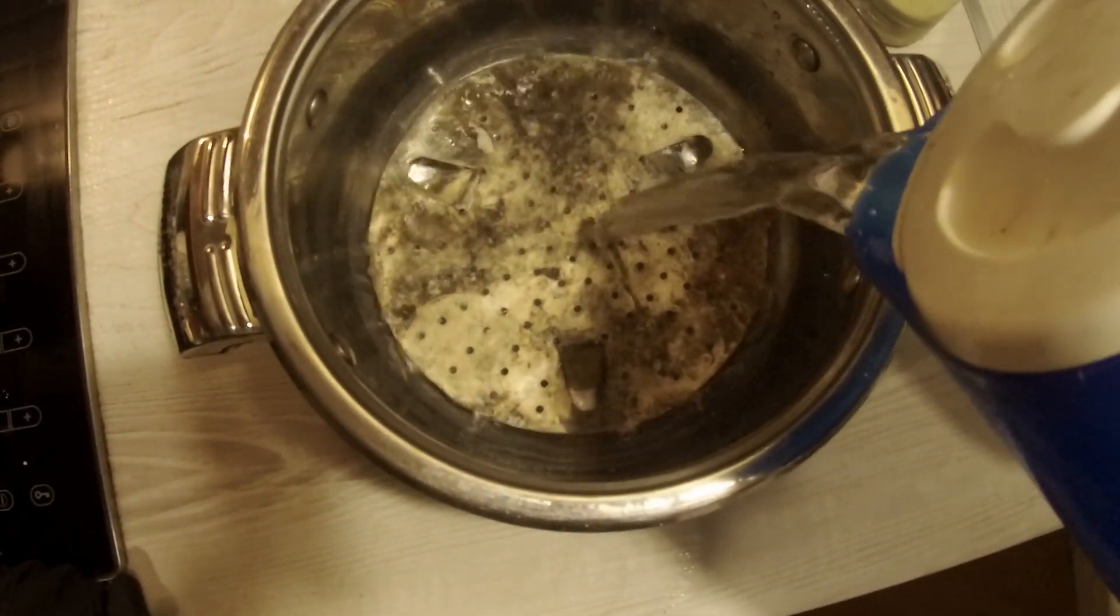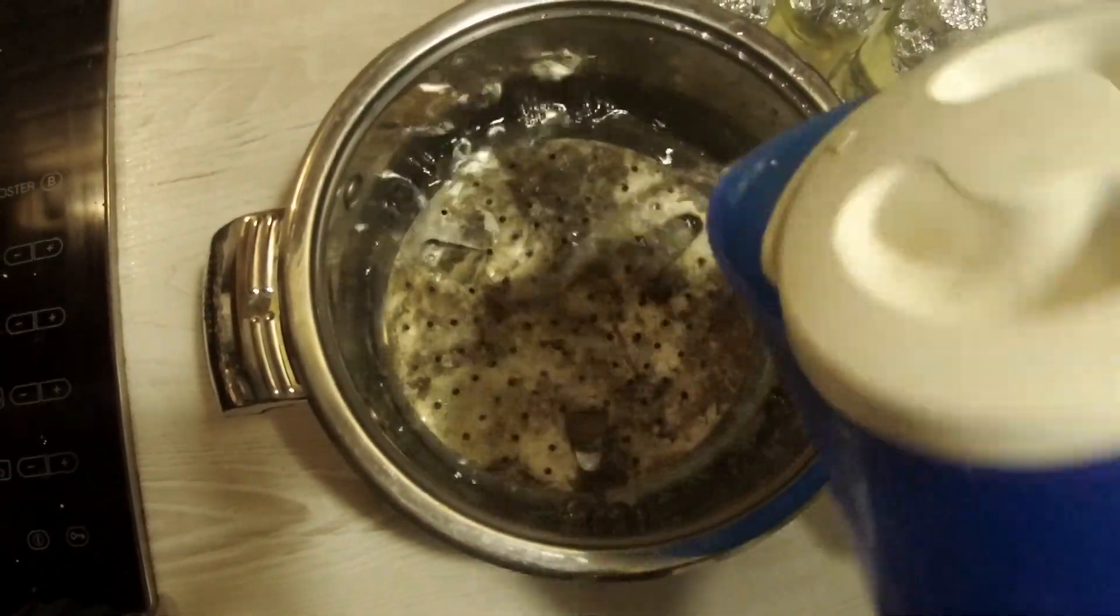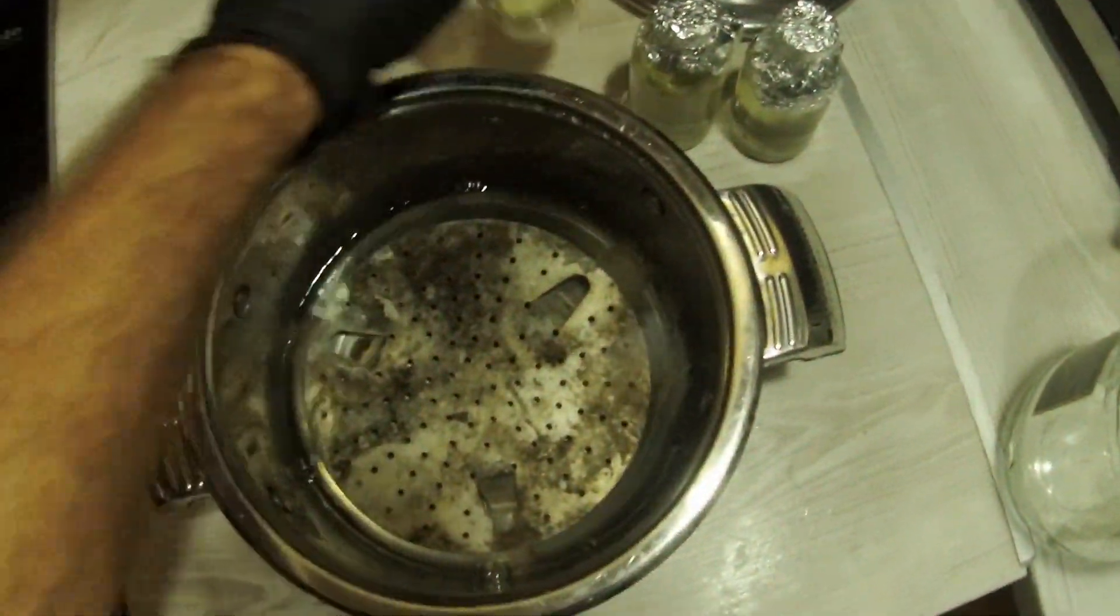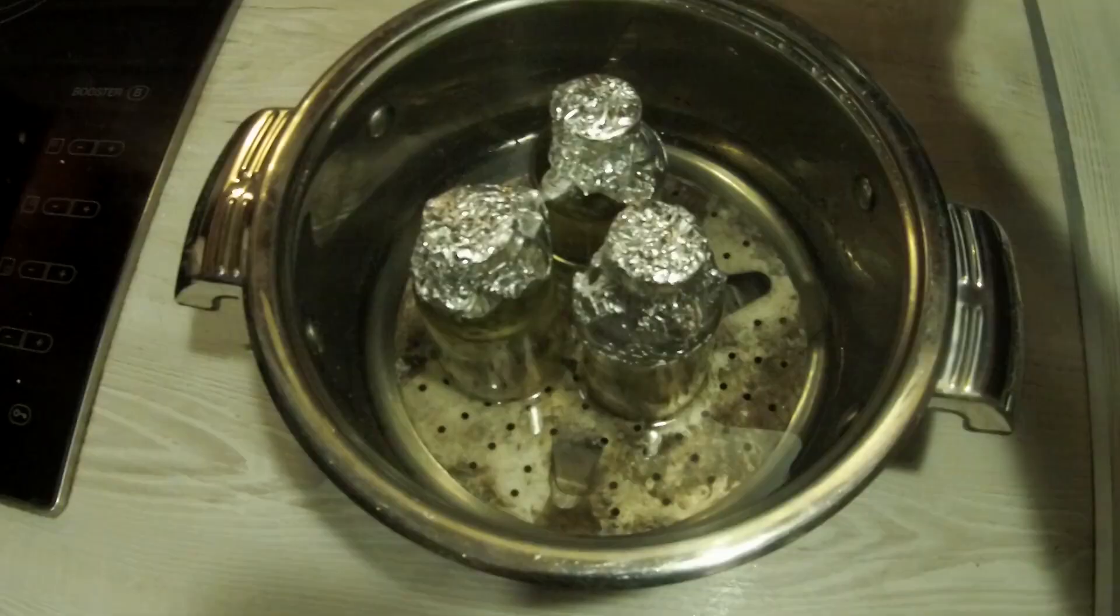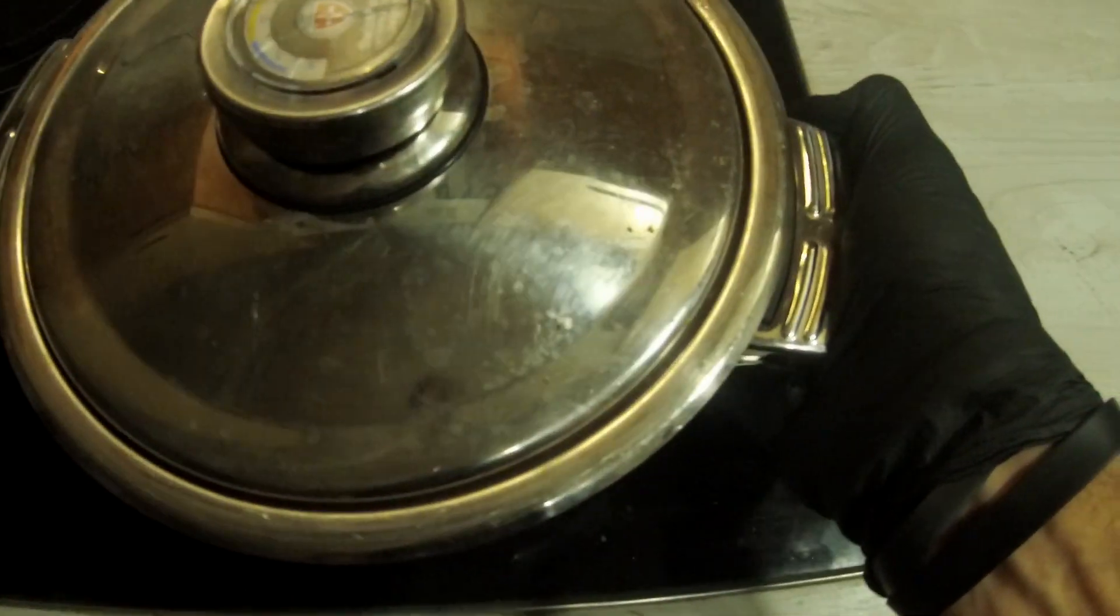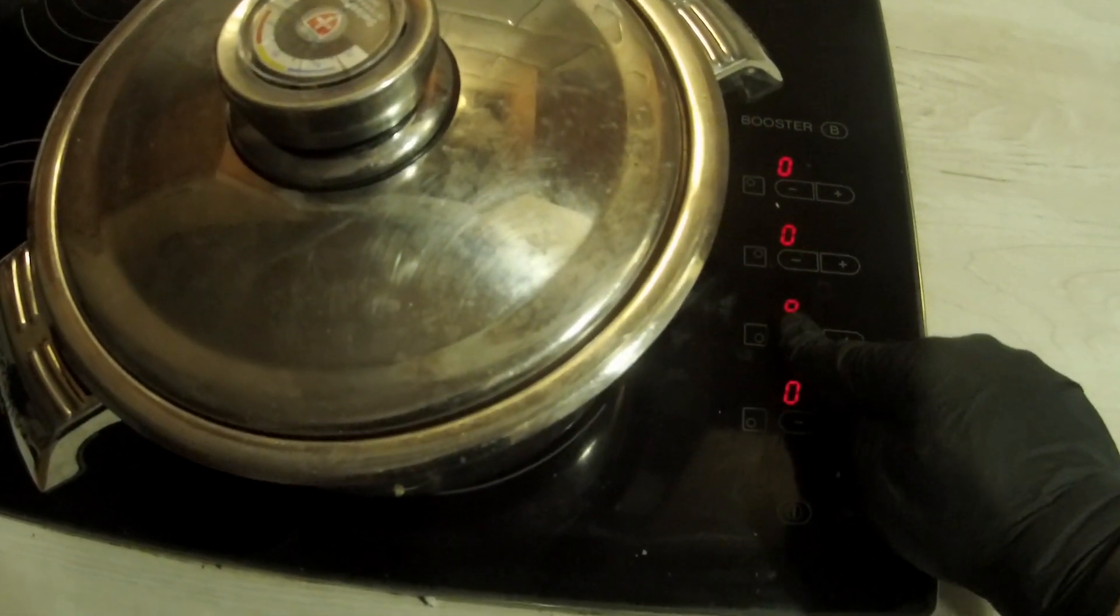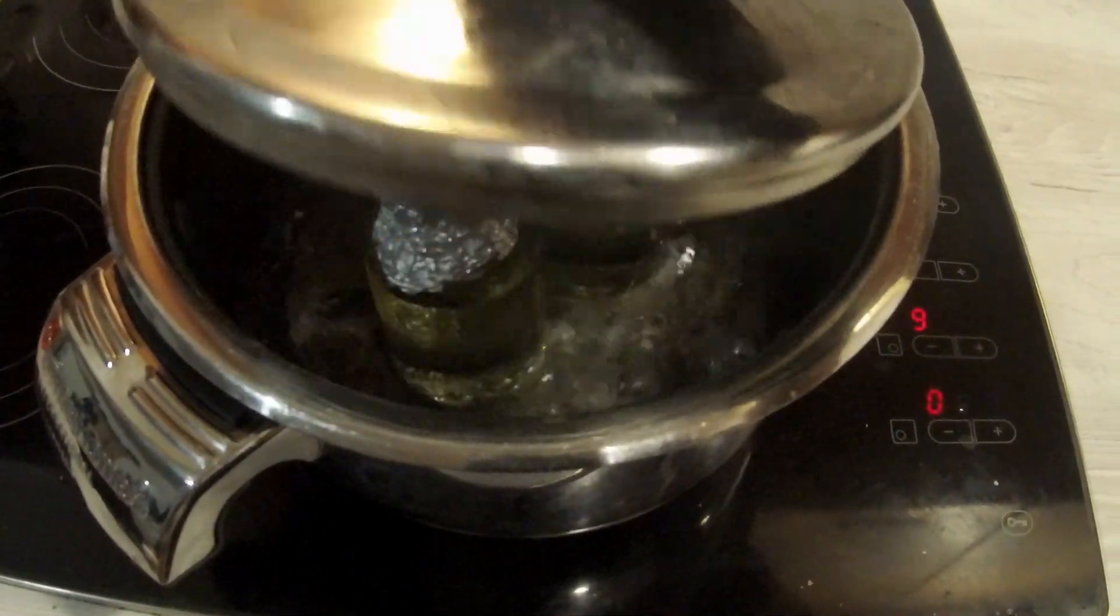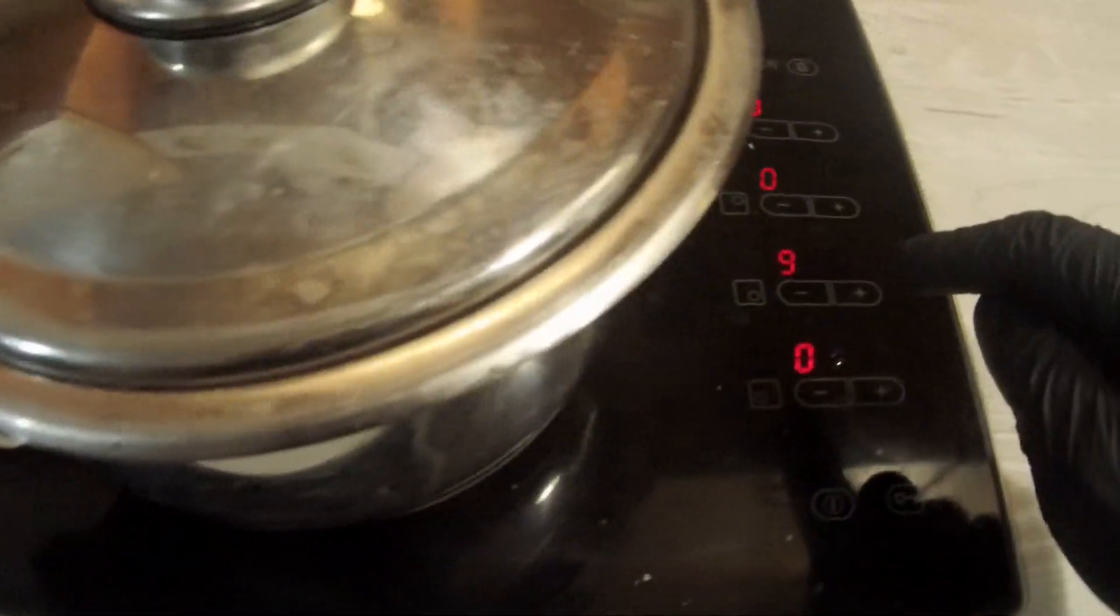We will put the vials inside our sterilization vessel. Then we will add enough water to cover the vials between one-fourth and one-half of their height. As soon as the water starts to boil, we will turn down the heat to a simmer and start our 15 minutes countdown.